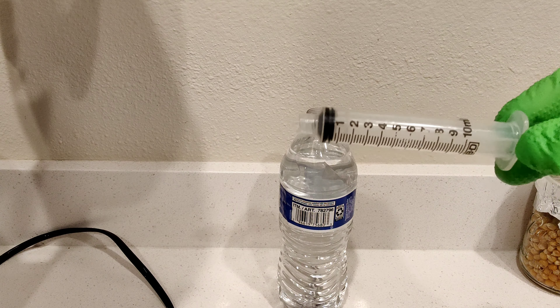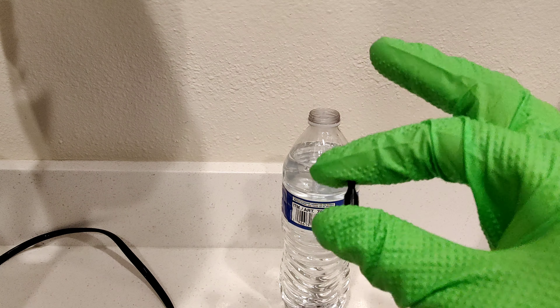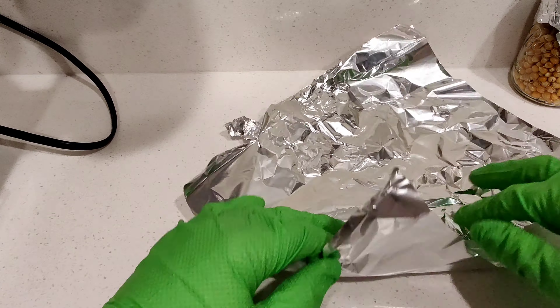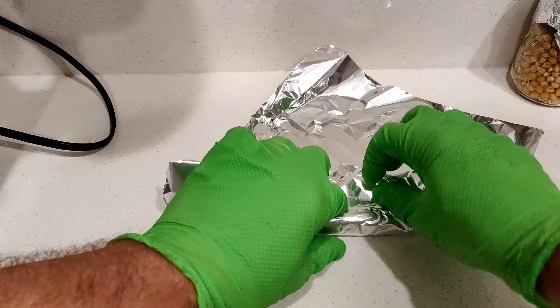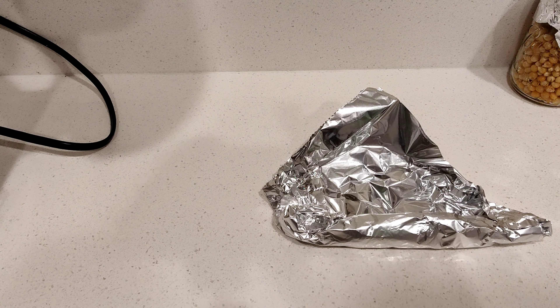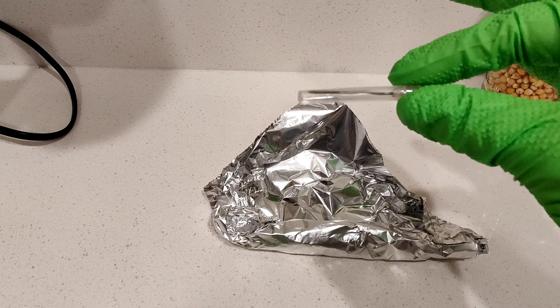I use a nice clean syringe, go ahead and fill it with the water. Then I put my stopper on. Once I've got my syringe full of water and my stopper on it, I wrap it in foil along with the needle.